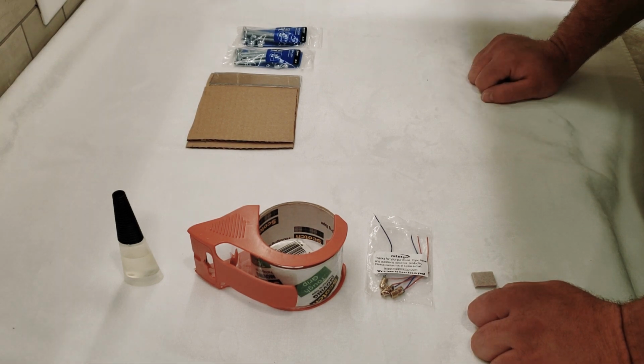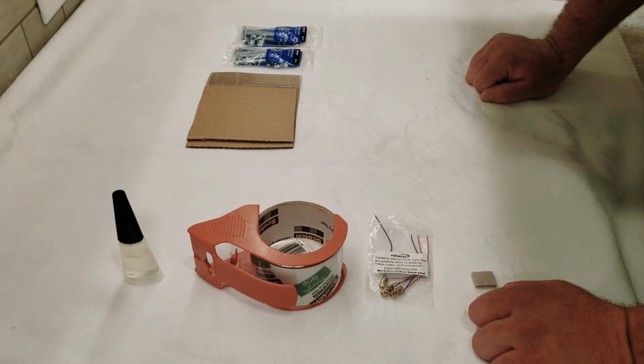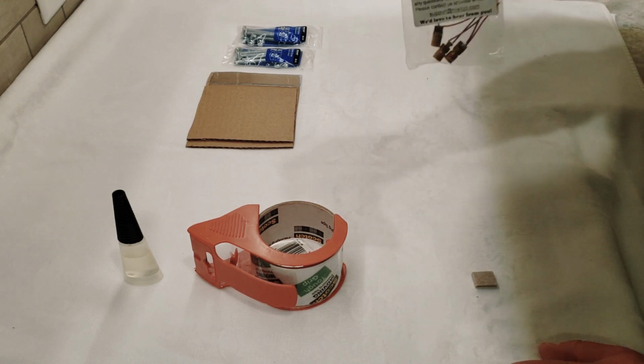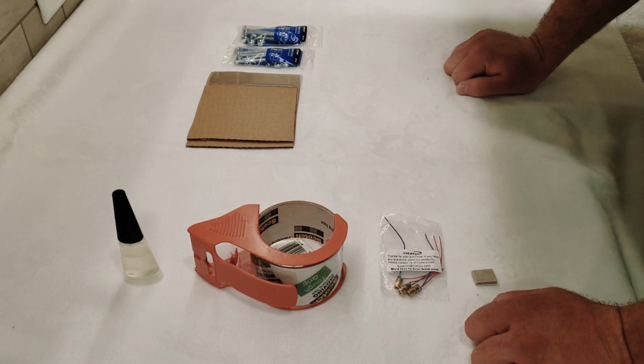To jump right in, there's only one thing that is absolutely necessary, and that is just any sort of small, cheap laser pointer. You can actually get this from any DVD player or any dollar store laser pointer you can pick up from the store, but when I went to Walmart and a couple dollar stores, I was not able to find any, so it was actually easier for me to just hop on Amazon real quick and buy a pack of 10 laser diodes. So it's this pack right here, and on Amazon it cost about, I think, $5 for 10 of them.